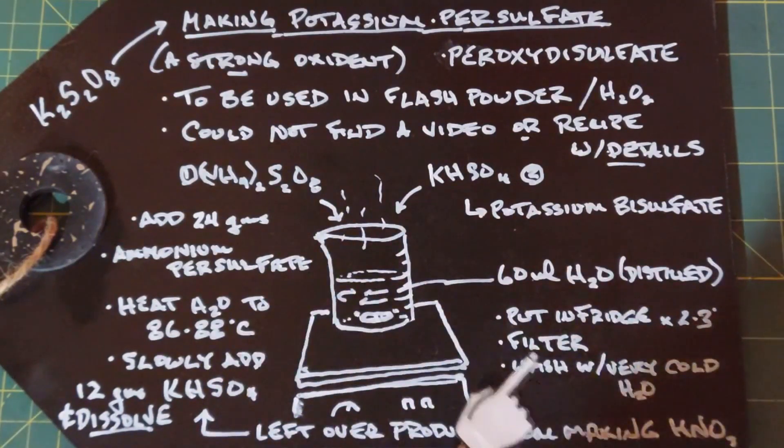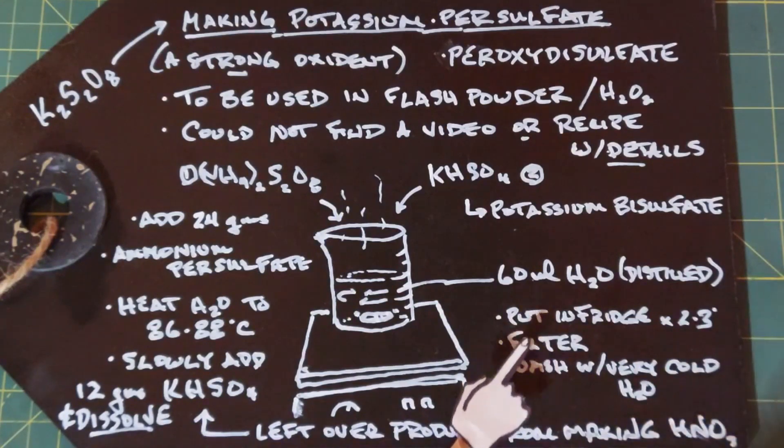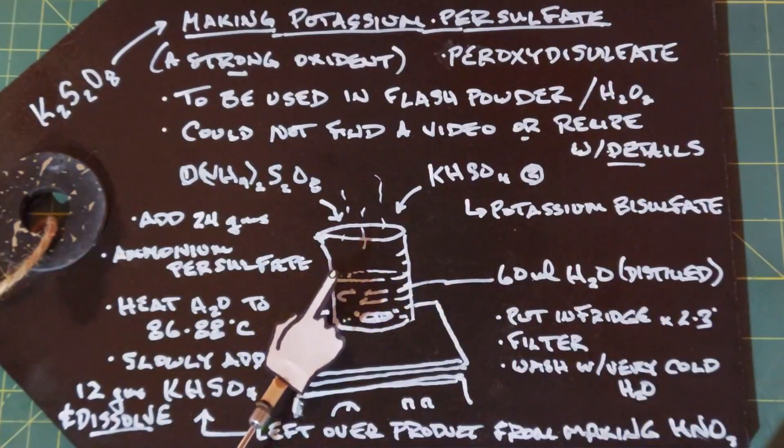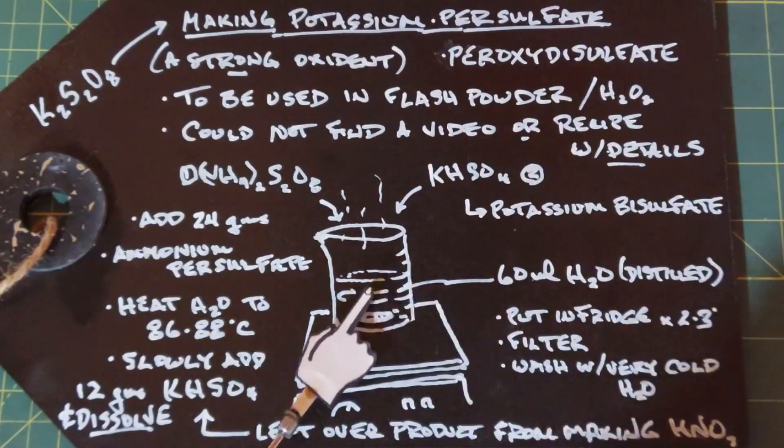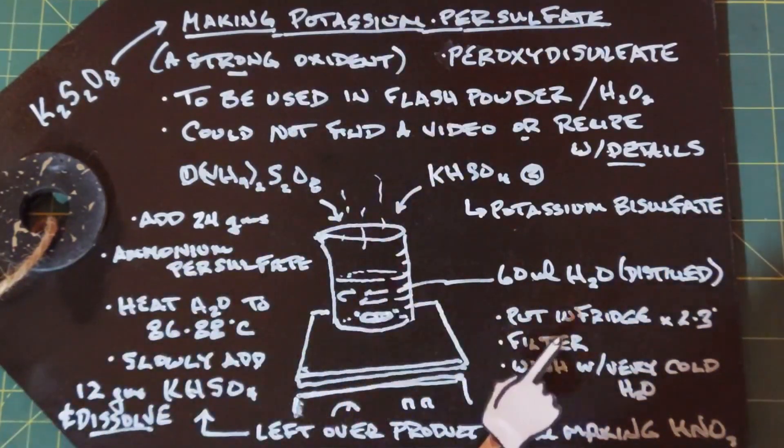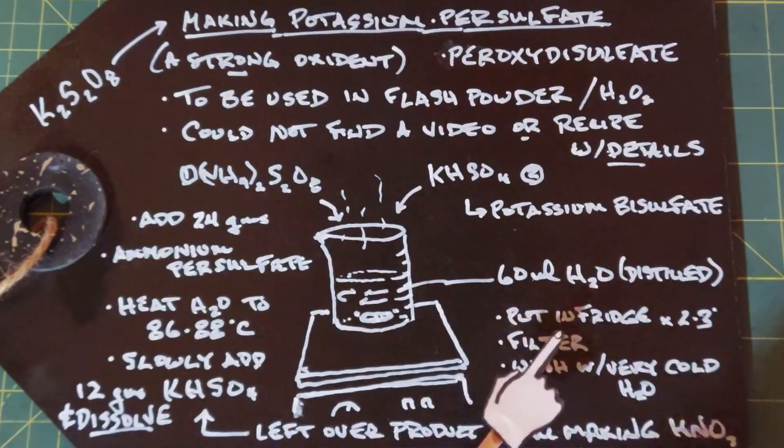I then filtered them. I used acid filter paper so that it wouldn't dissolve. I don't know what would happen if you used regular filter paper, but because of the strong oxidant nature of the potassium persulfate, I did use acid-resistant filter paper.